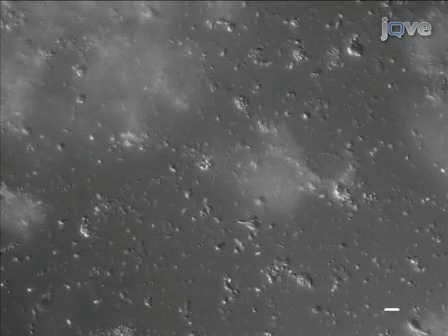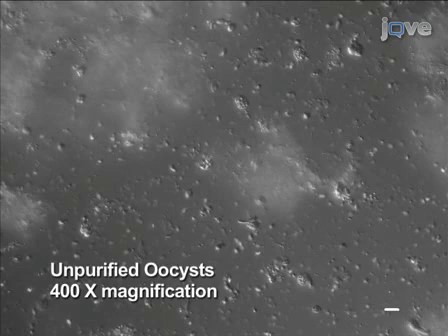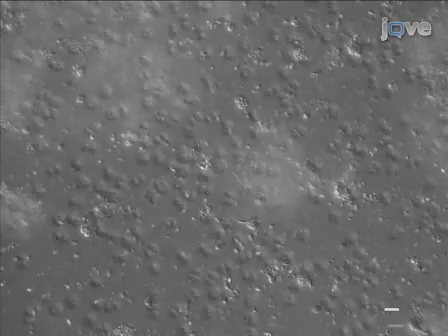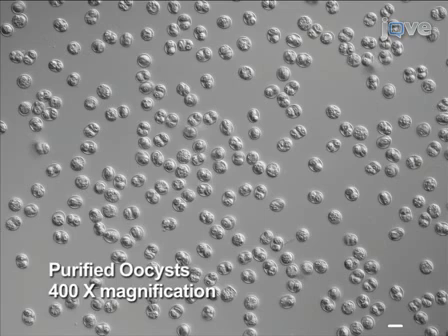Here is a look at what unpurified oocysts look like using a differential interference contrast microscope at 400x magnification. Notice the presence of large amounts of fecal contaminants in the field, making it very difficult to identify the oocysts. Here is what the oocysts look like under 400x after the cesium chloride gradient purification protocol. Notice the absence of fecal debris.